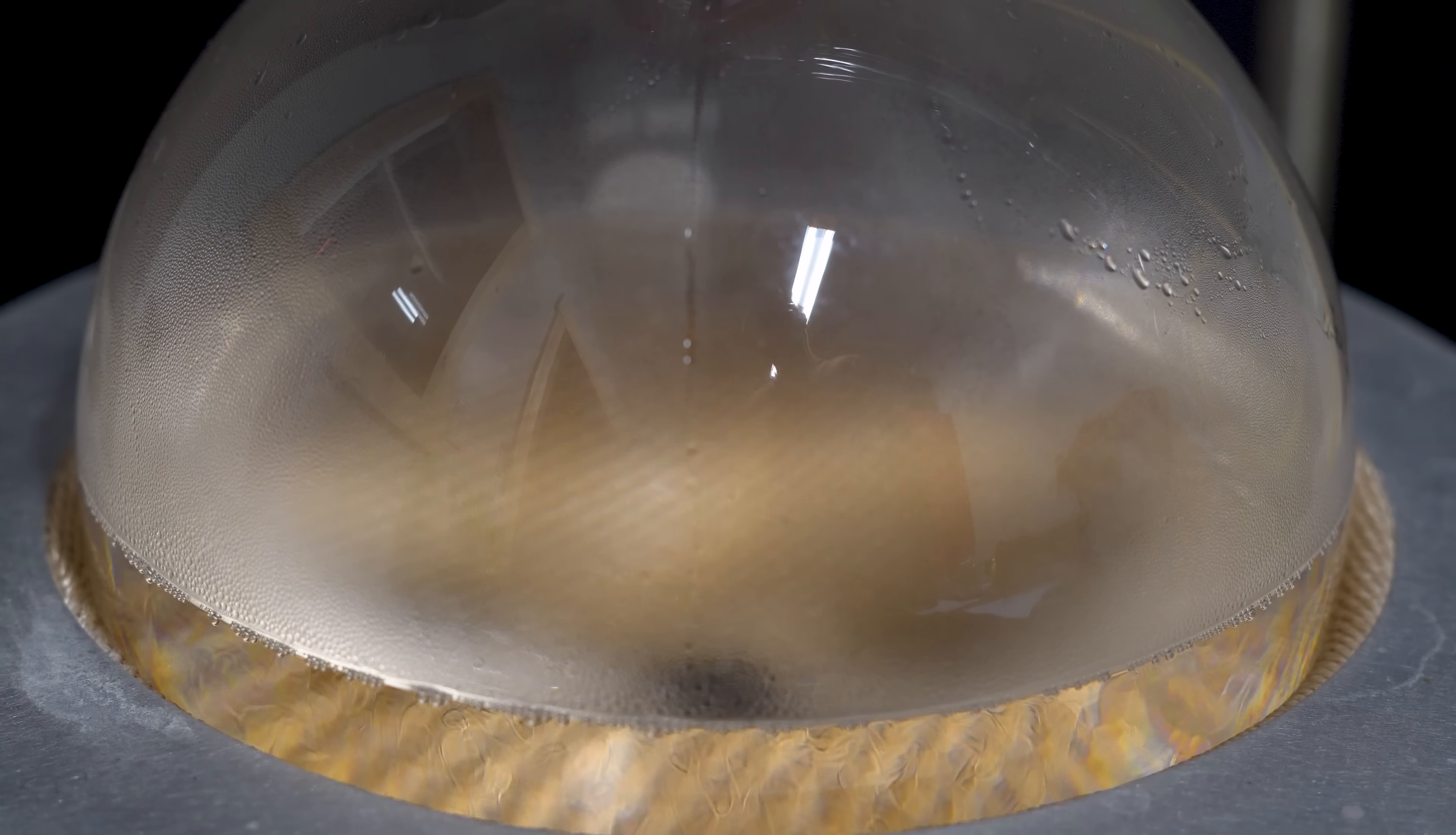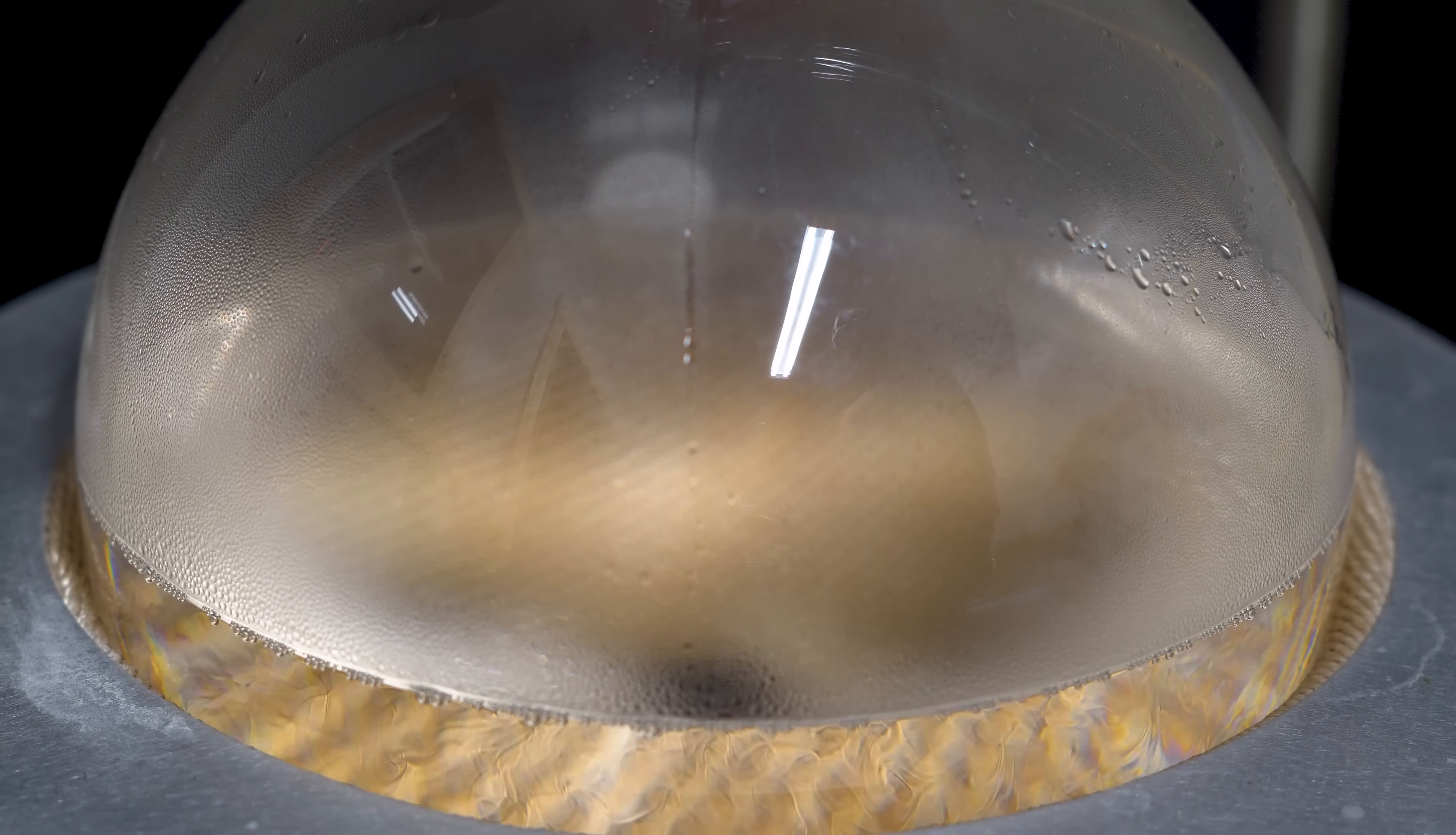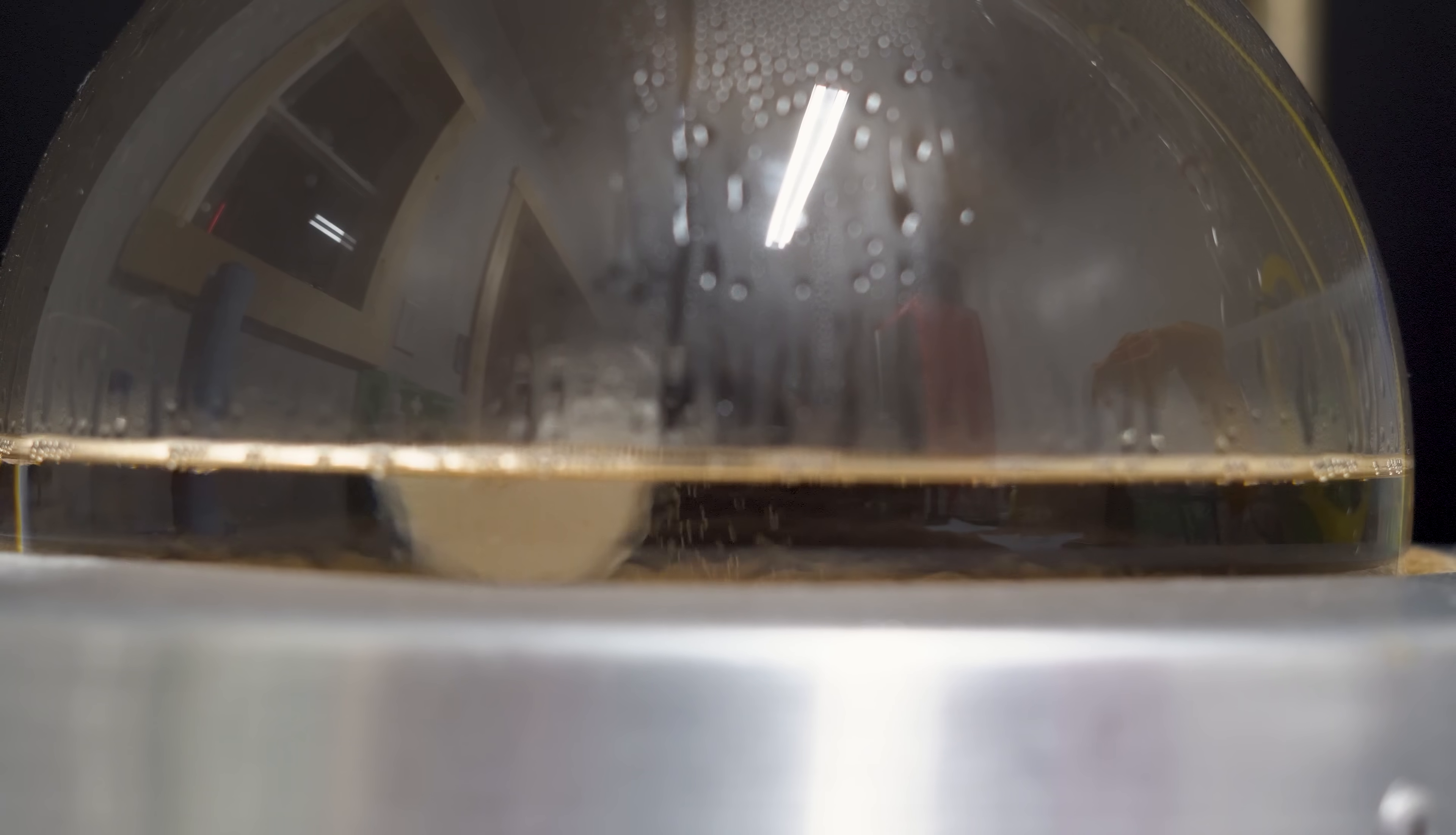I turned on heating, and just a little bit after, you can see these really odd lines swirling around in the flask. If you don't know what it is, then likely there's two things that are going on. Number one is convection currents, and even with multiple compounds, convection currents will still be present. As the solution heats, parts of it will warm up and rise while the cooler parts sink, creating visible flow patterns or lines in the solution.